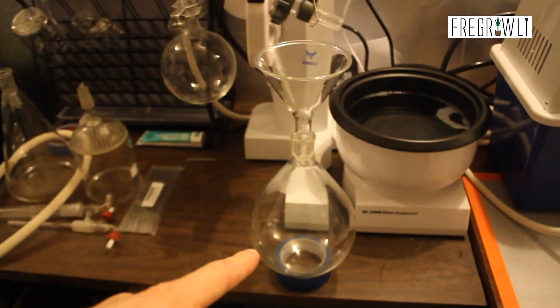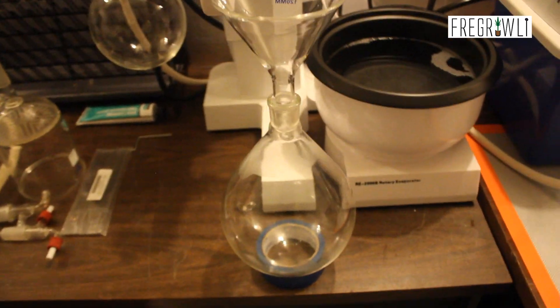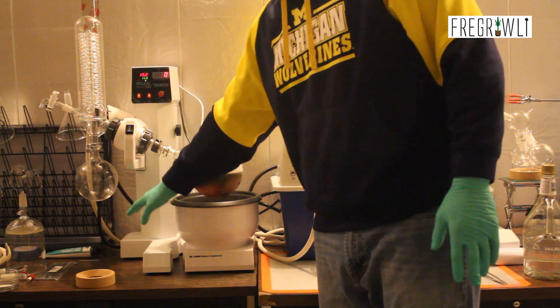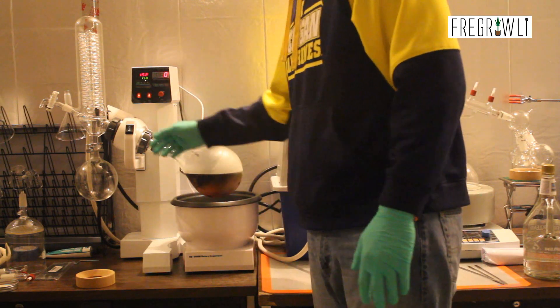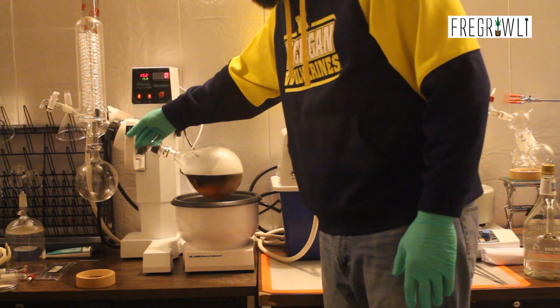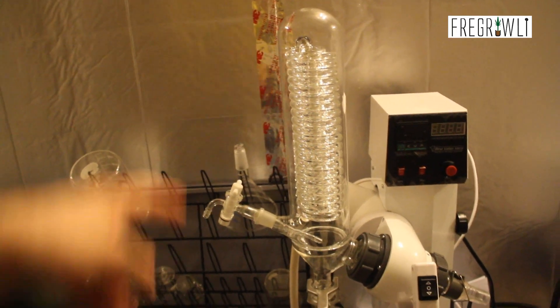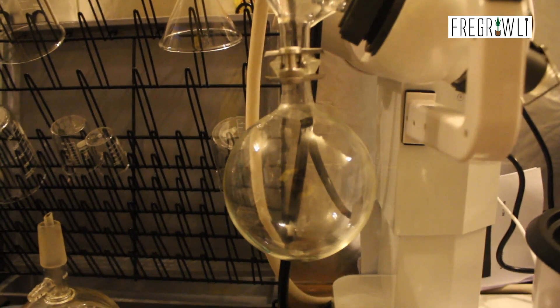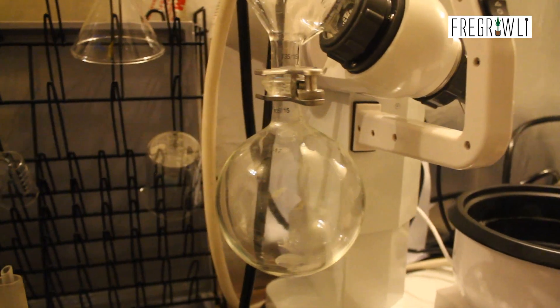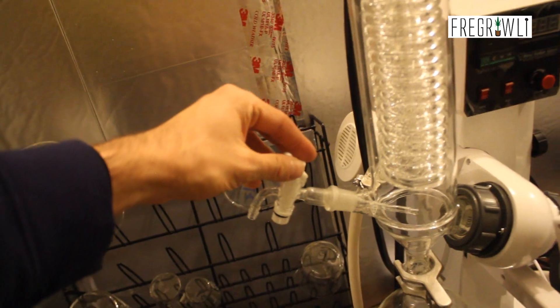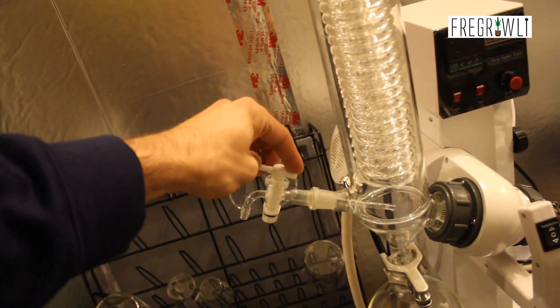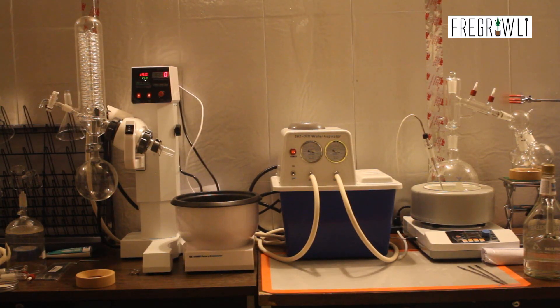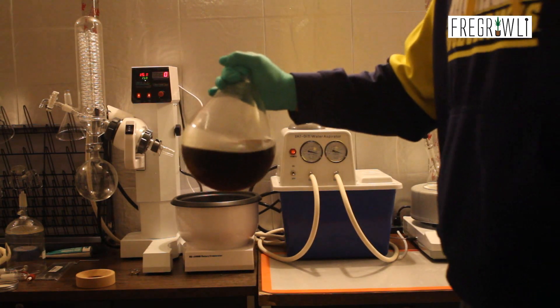The lift jack raises and lowers your evaporation flask in and out of the hot water bath. The hot water bath keeps your flask and extract at the desired temperature. The condenser recondenses your evaporated solvent into a liquid. The receiving flask collects all of the recondensed solvent for you to reuse. The vacuum valve allows you to manually adjust the vacuum level in the system, although you could purchase a vacuum regulator to do this automatically. And the evaporation flask will contain your finished and unfinished extract.